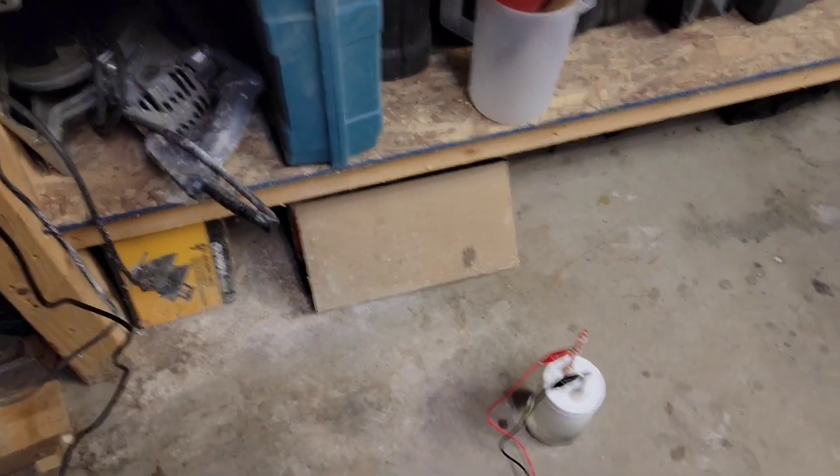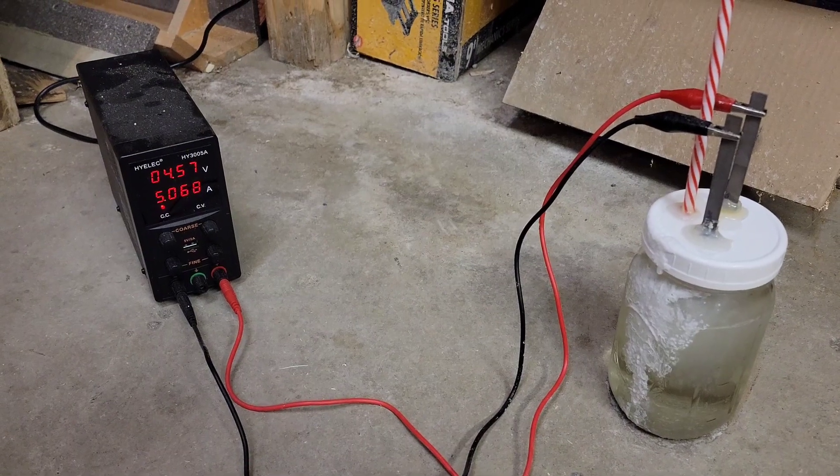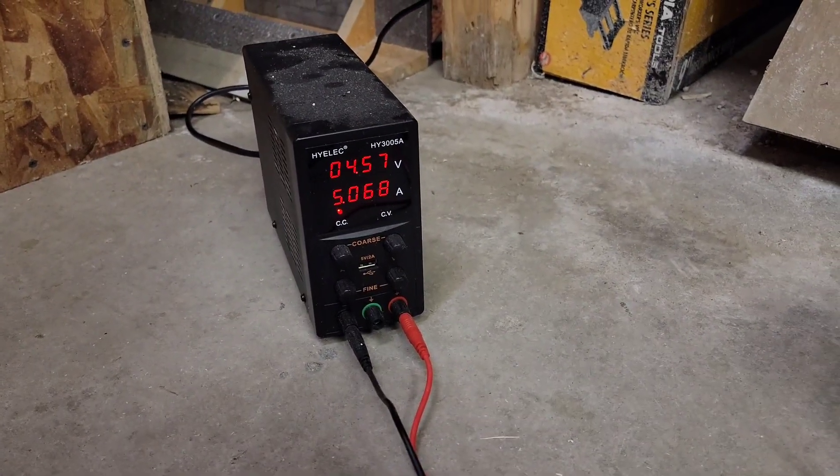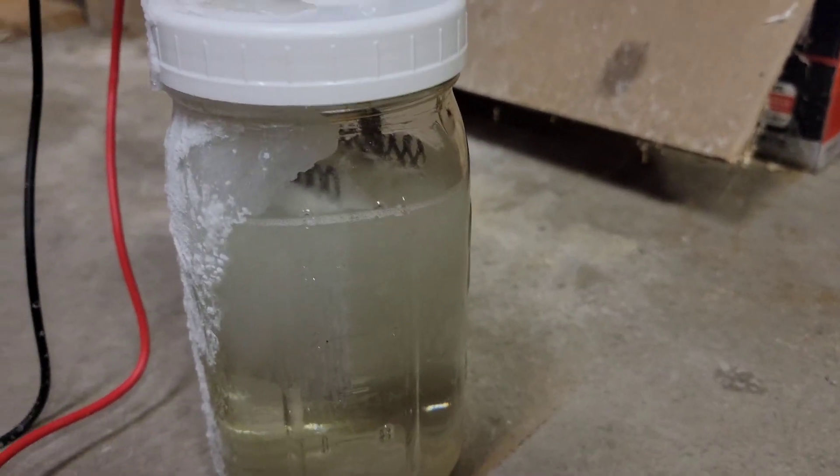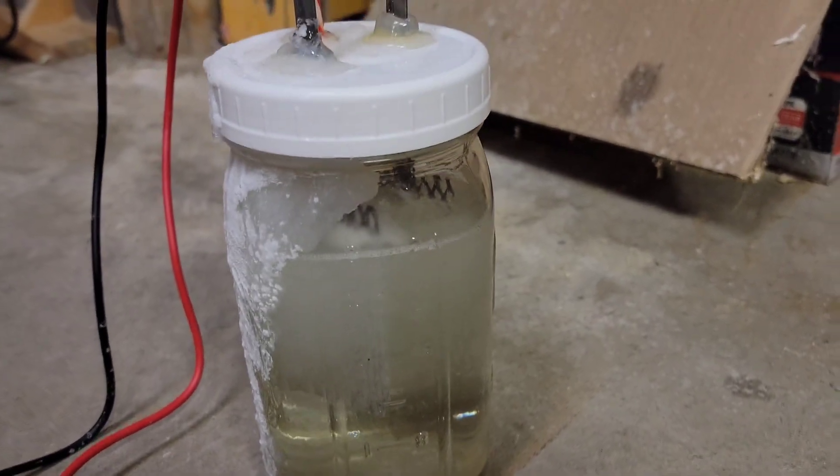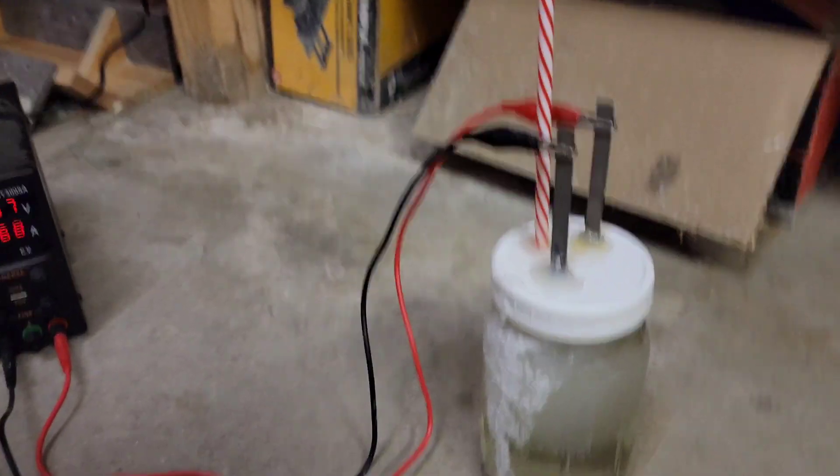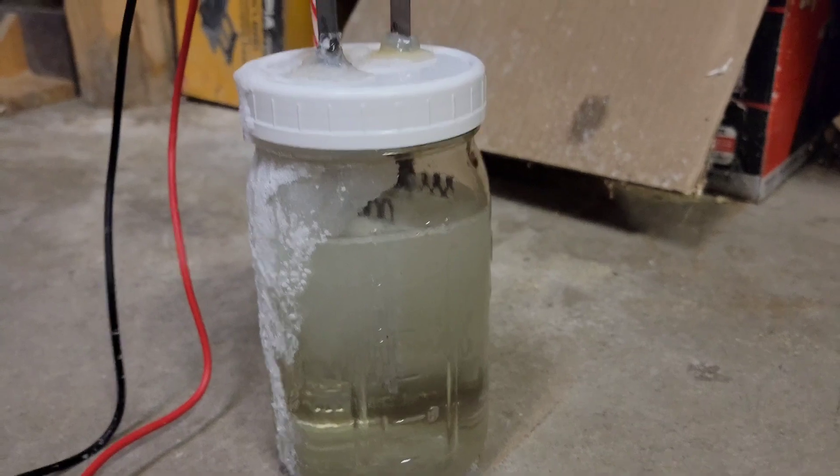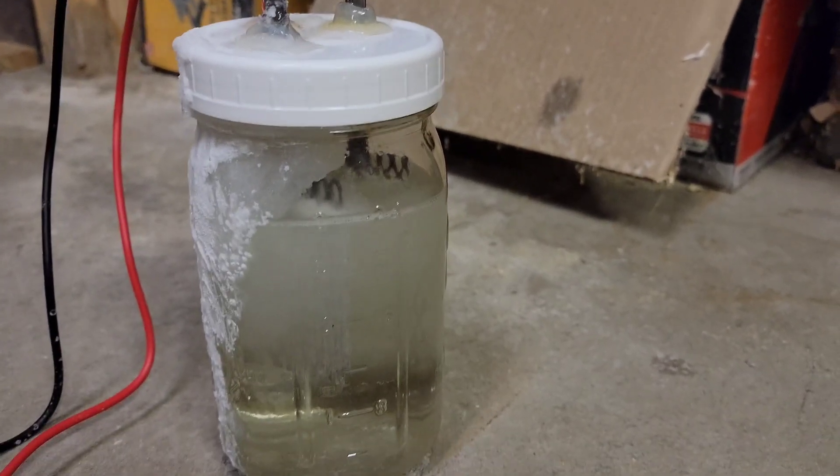Okay, it's been about three days now and you can see the voltage has risen quite a bit and the water level has also decreased. So this is where we actually got to add a little bit more salt in it.